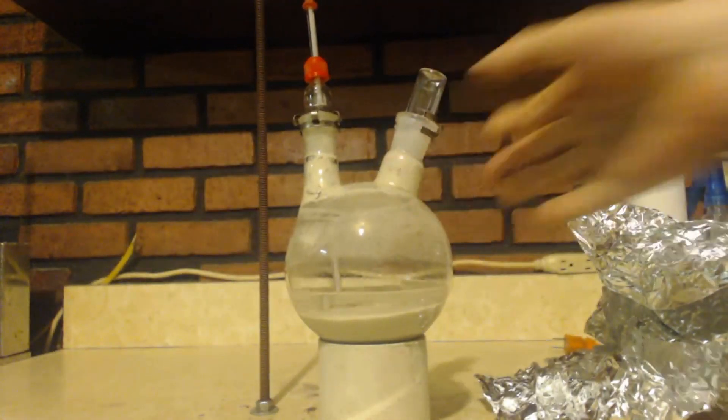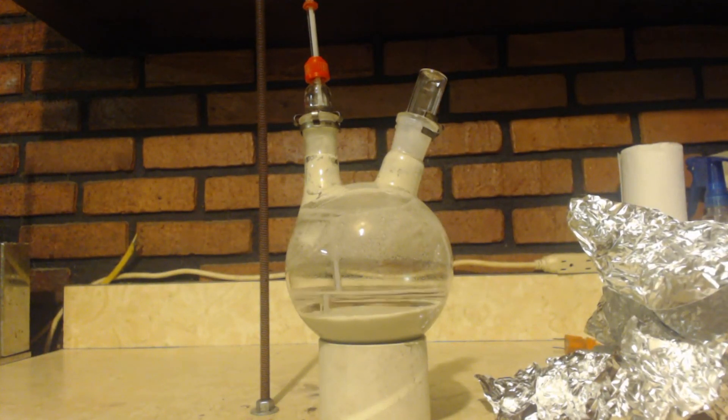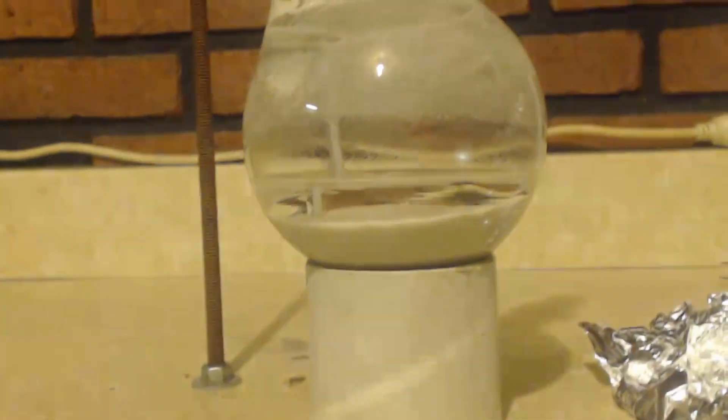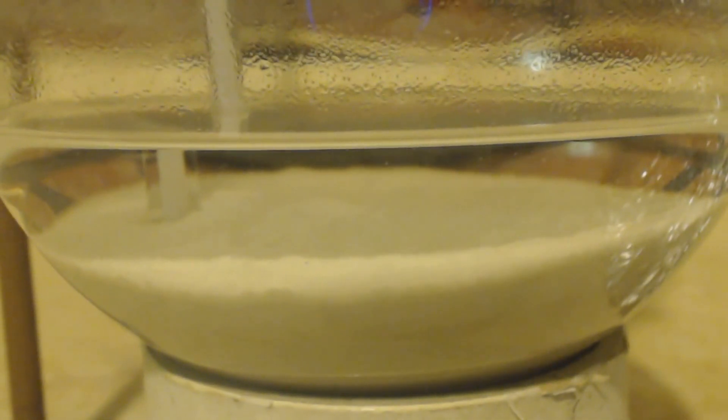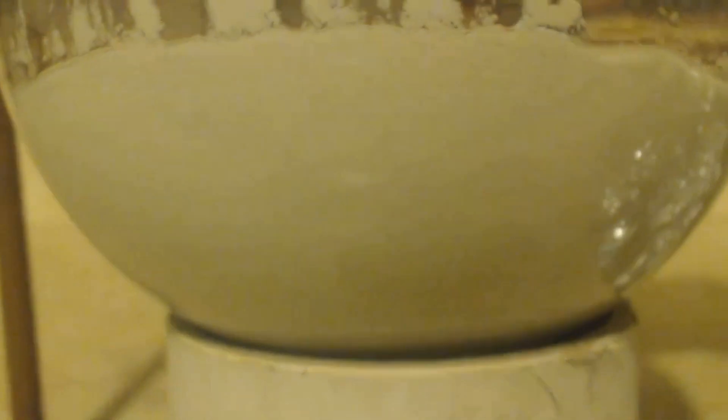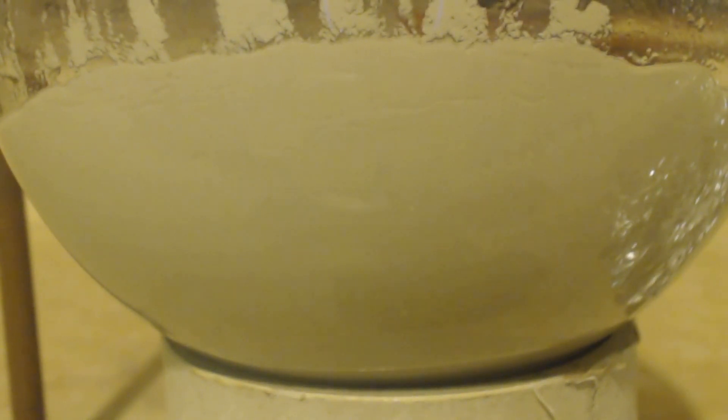Well, something did happen. Now, this used to be a nice yellow. It wasn't a dark yellow. It was nice, bright, clean, yellow. Now, it's kind of white. An off-white, like gray, almost. That definitely ain't yellow. I know you can't really tell as good as me on camera. But that is definitely not yellow. It's a gray, a grayish white. So, something did happen.